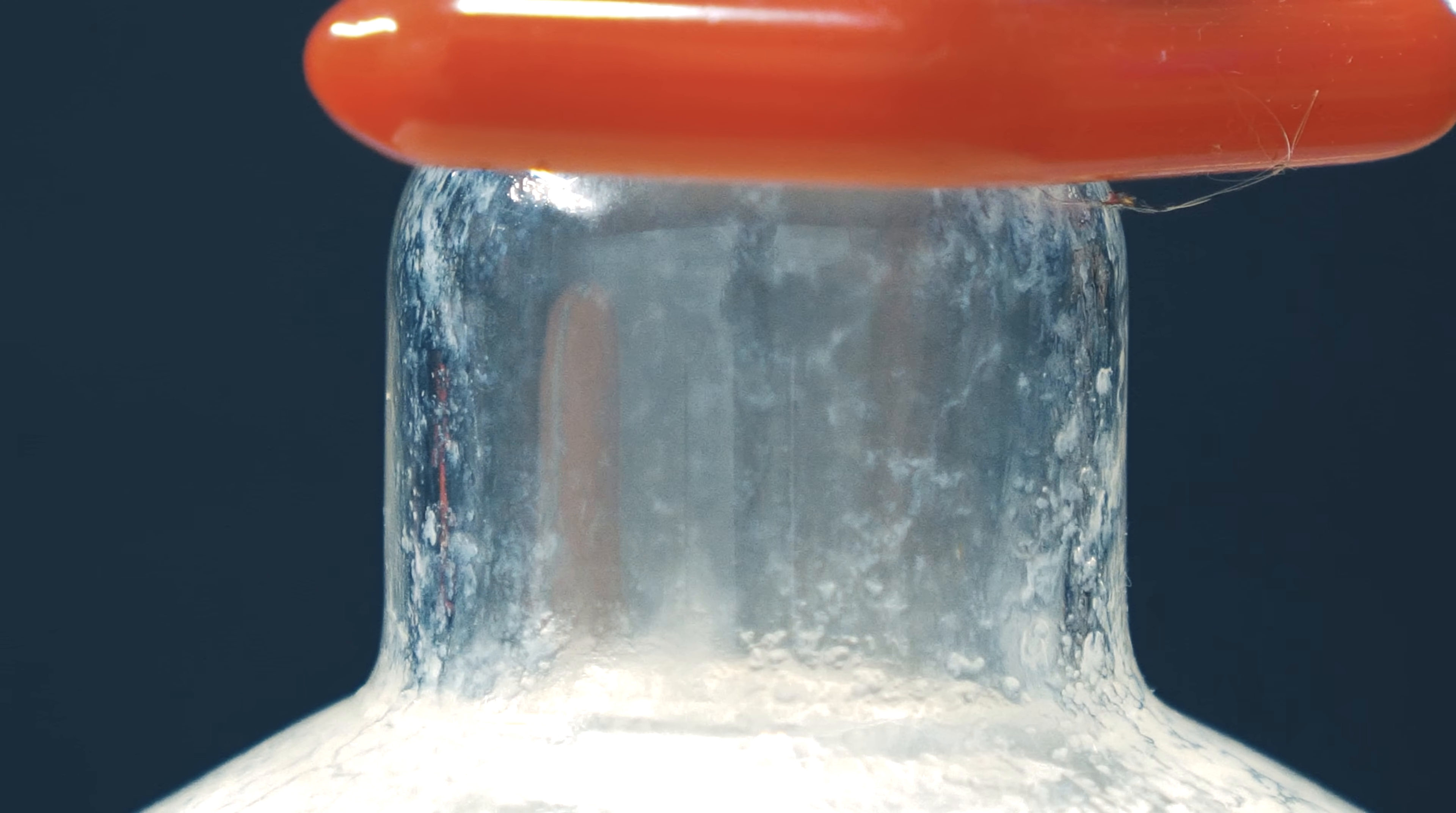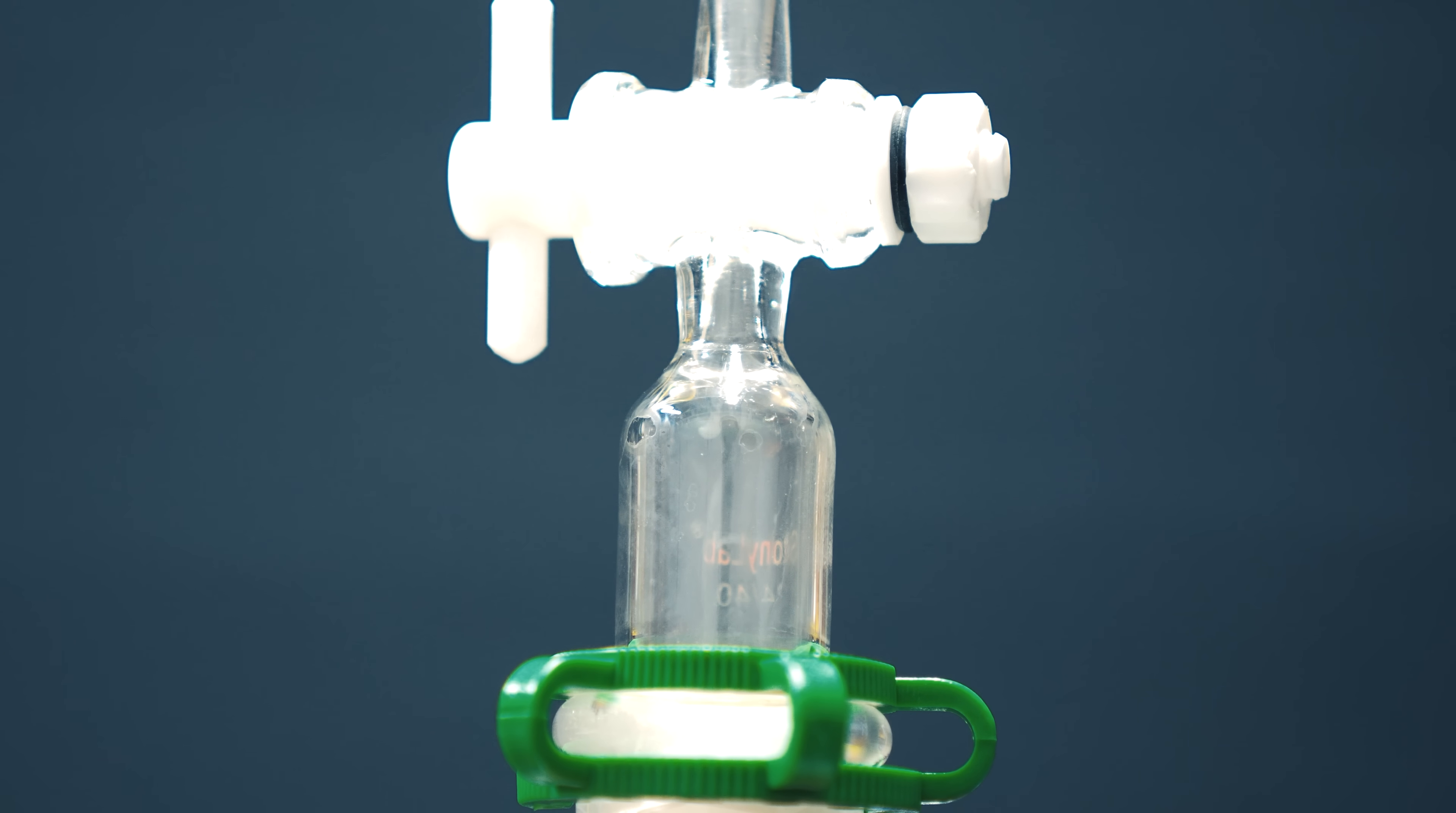The procedure called for a distillation setup, but I was just going to be boiling the methylamine out of it anyway. It does say to distill the reaction contents carefully to first liberate the first 40% constant boiling solution and then the gas itself.